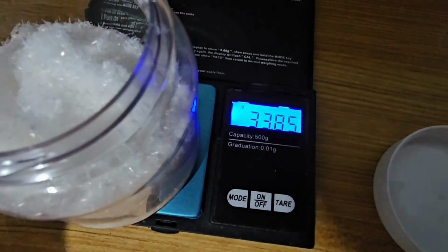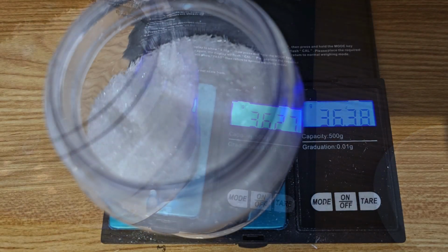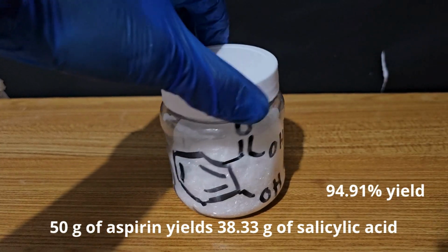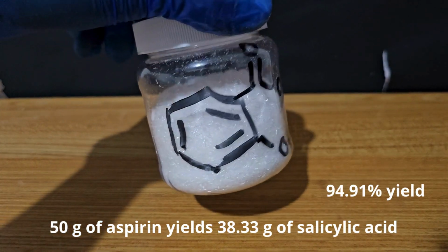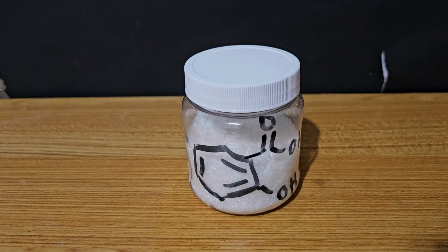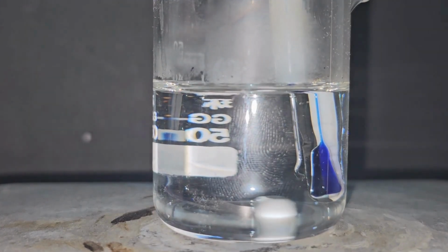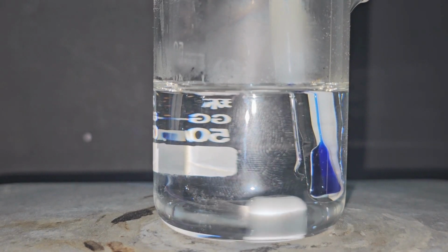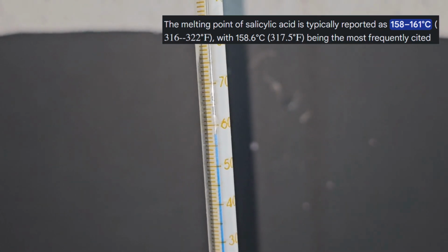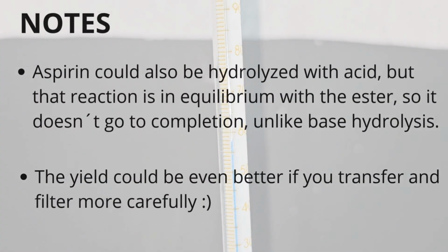I weighed all the crystals, and at the end I got 36.38 grams of salicylic acid, which represents a quite impressive yield of 94.9%. This yield is amazing because we extract and hydrolyze aspirin, and there are losses in every part of the process, so I'm pretty satisfied with the results. To finish the experiment, I did a melting point test, and it resulted to be between 158 and 159 C, which is pretty accurate with the theoretical value.